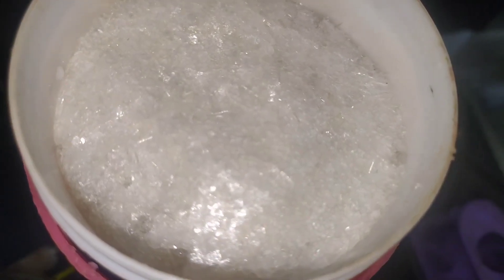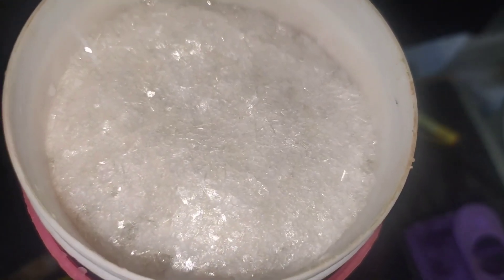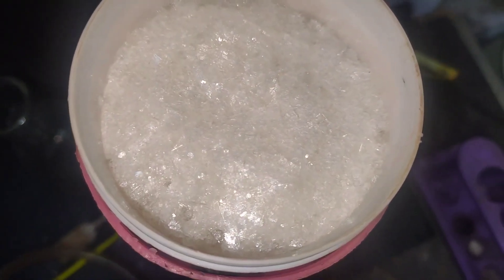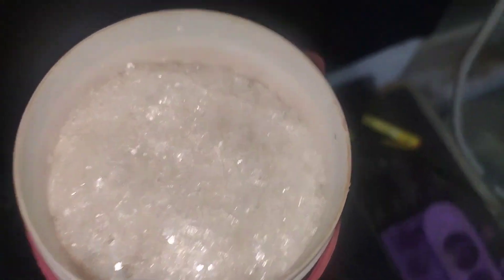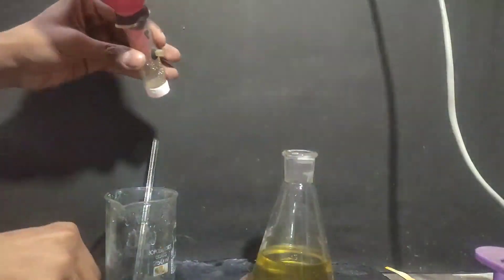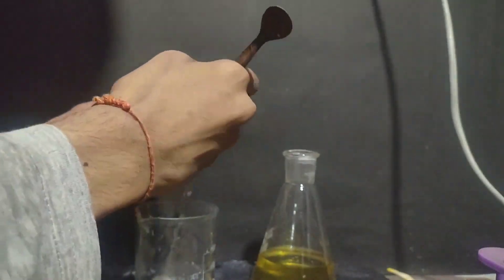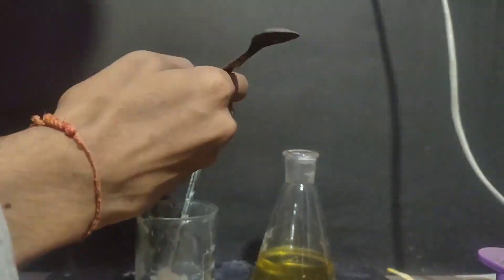The crystals look pretty nice and clean but I decided to do one more recrystallization to remove impurities of potassium chloride and other impurities that were present in the fertilizer. After draining off all the solution I transferred the crystals into a beaker.